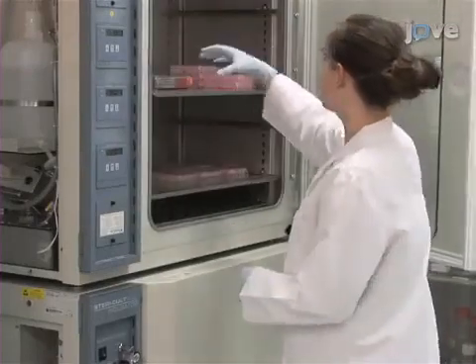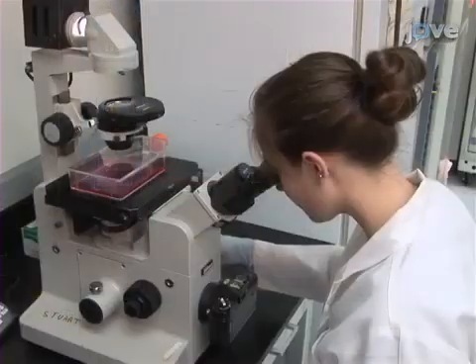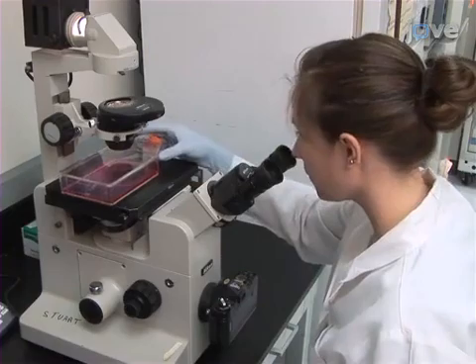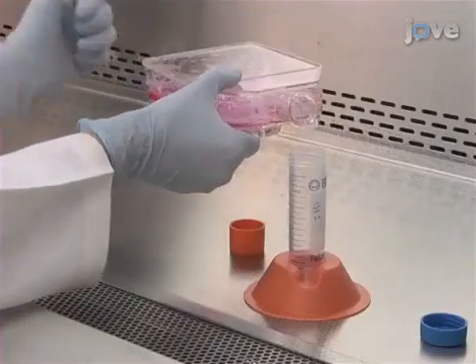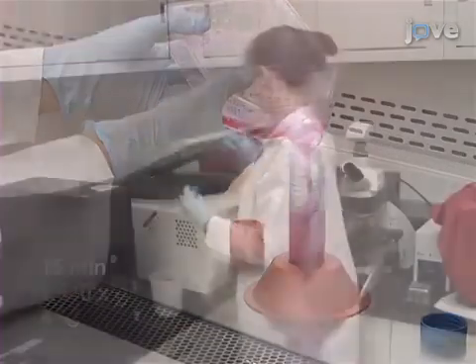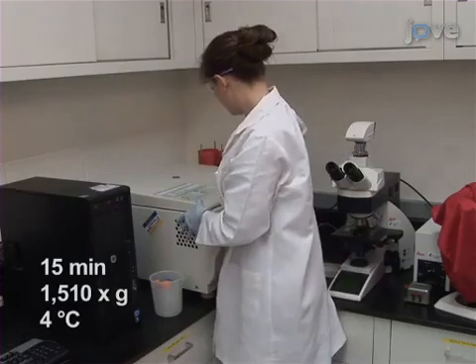Begin the experiment by growing HSV1 on Vero cells for three to four days to 80% confluency in a T150 flask. The cells will have rounded up by this time and will be easily dislodged by hitting the flask. Transfer the cell suspension to sterile 50 milliliter conical tubes and spin down the cells for 15 minutes at 1510 times G at 4 degrees Celsius in a benchtop centrifuge.